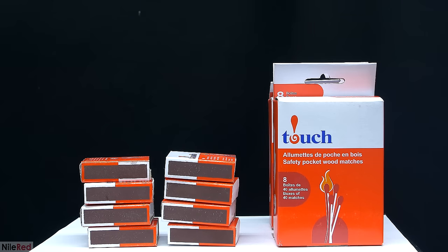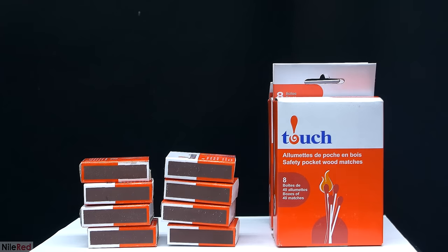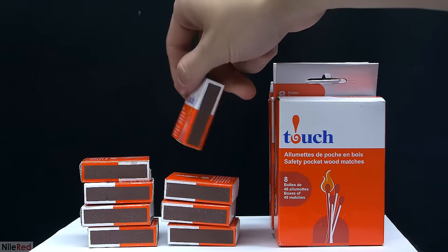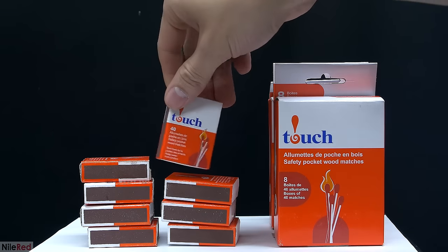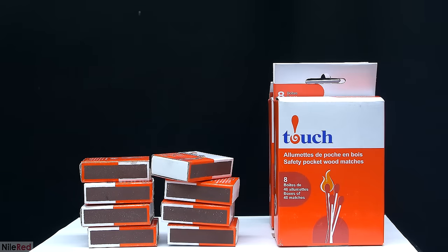For this video, I'm going to be stripping eight matchboxes that have striker pads on both sides. I think it's important to point out that what I do here works well for these matchboxes, but it might not work well for another brand.